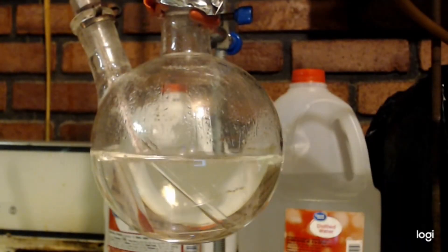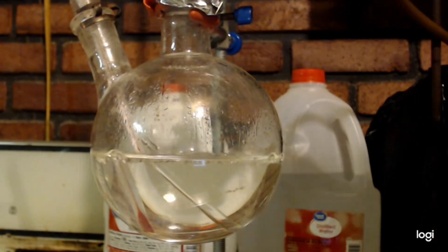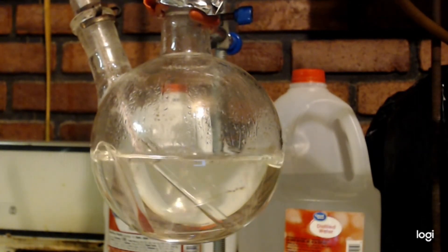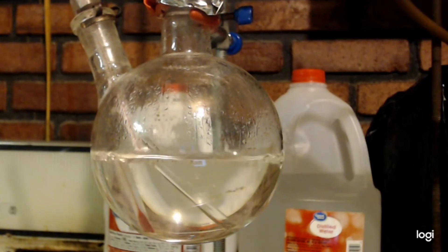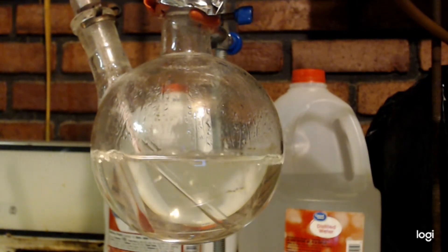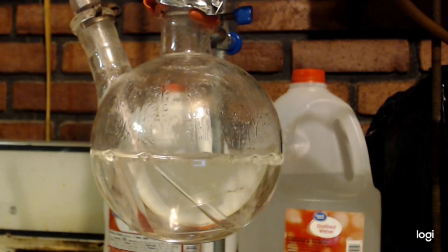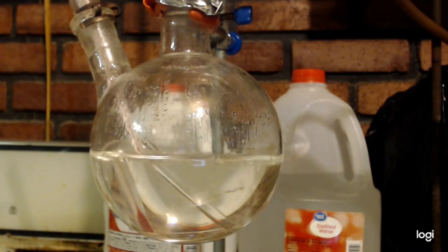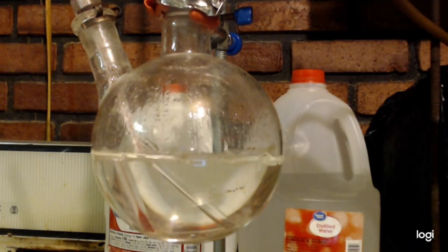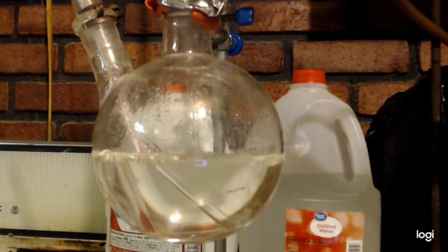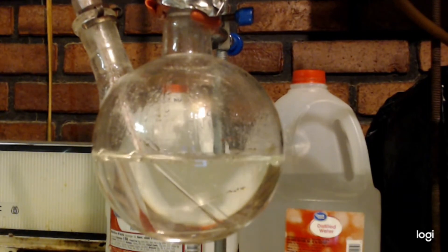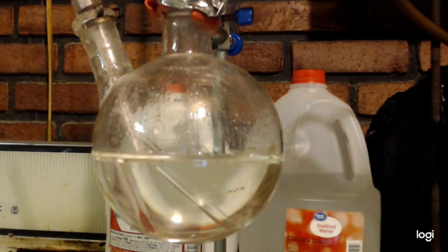Okay, let me try and show you what it looks like when I put the vacuum on. You can't keep it on there. You will definitely bump everything up into the condenser. Okay, here it goes. Now, when I do it, I'm going to be watching my pot, so I know I'm not going to overdo it. See how the bubbles, I just do a little bit, just for a couple seconds. You do that every 10 minutes or so, 15 minutes to get some of that CO2 out of there.